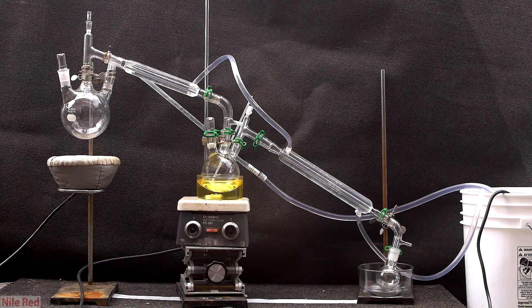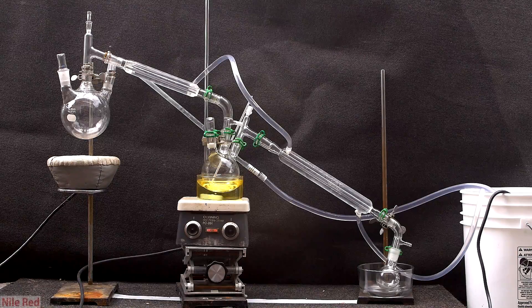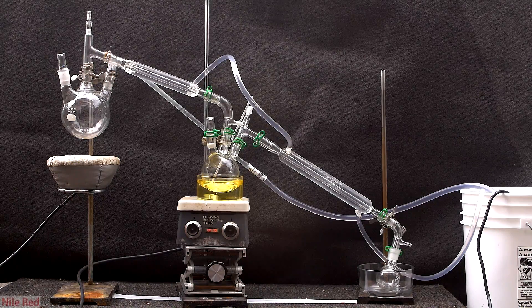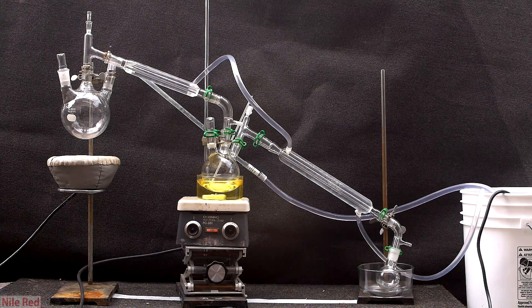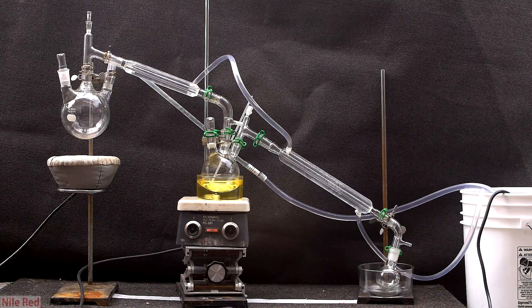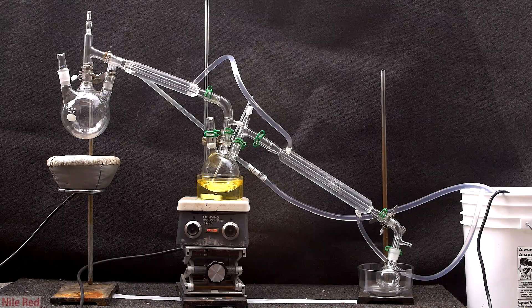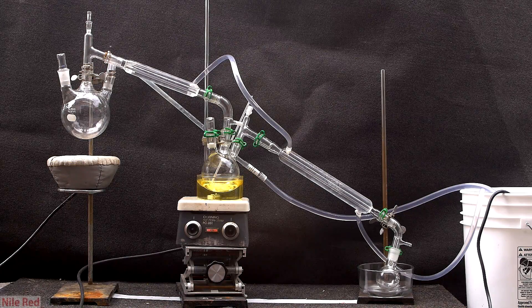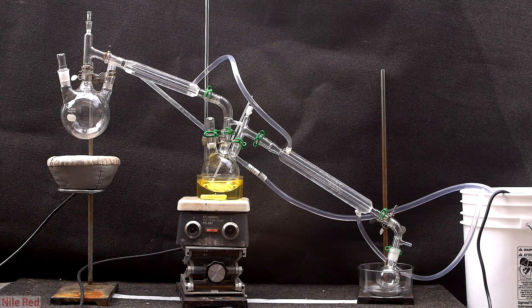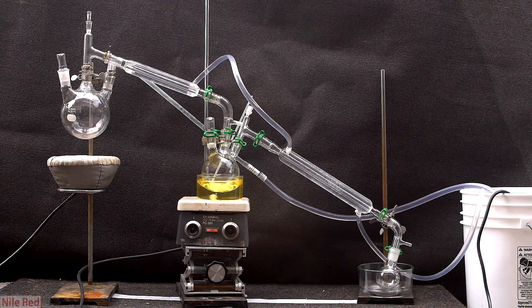This is what the entire apparatus looked like, and you can see that it's a little bit complicated. On the far left, we have our flask where the reaction is going to take place. In the middle, we have a flask with some regular salt in it with an oil bath underneath, and on the far right, we have our receiving flask. As we continue with the preparation, you'll see why the middle flask was really necessary.